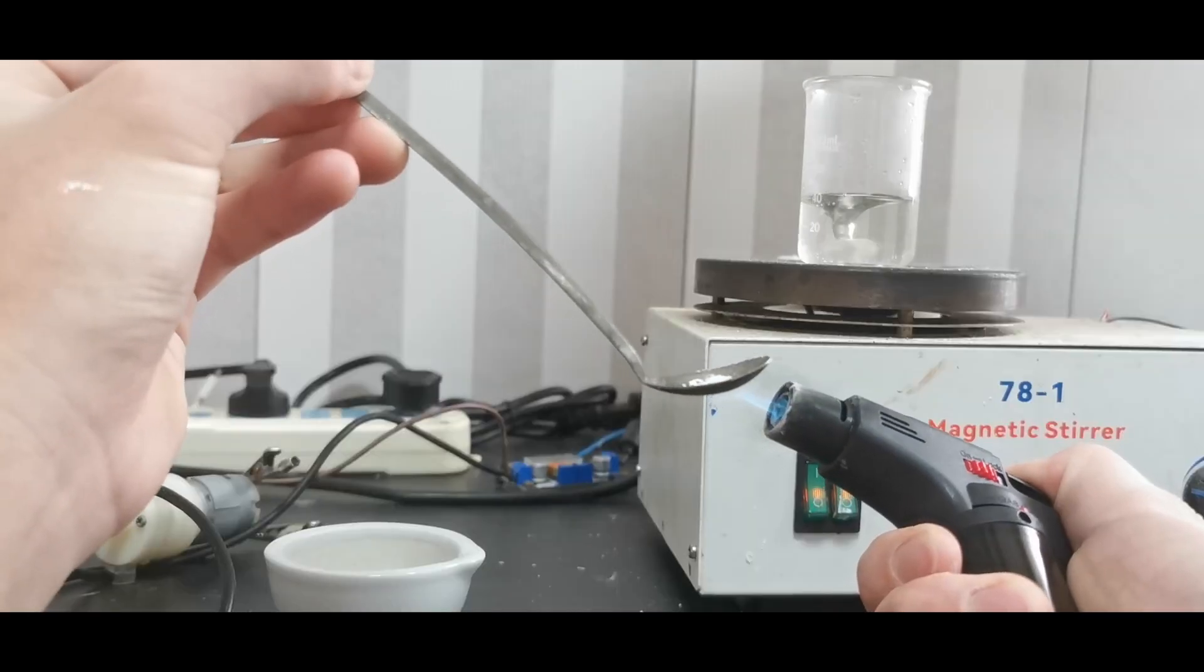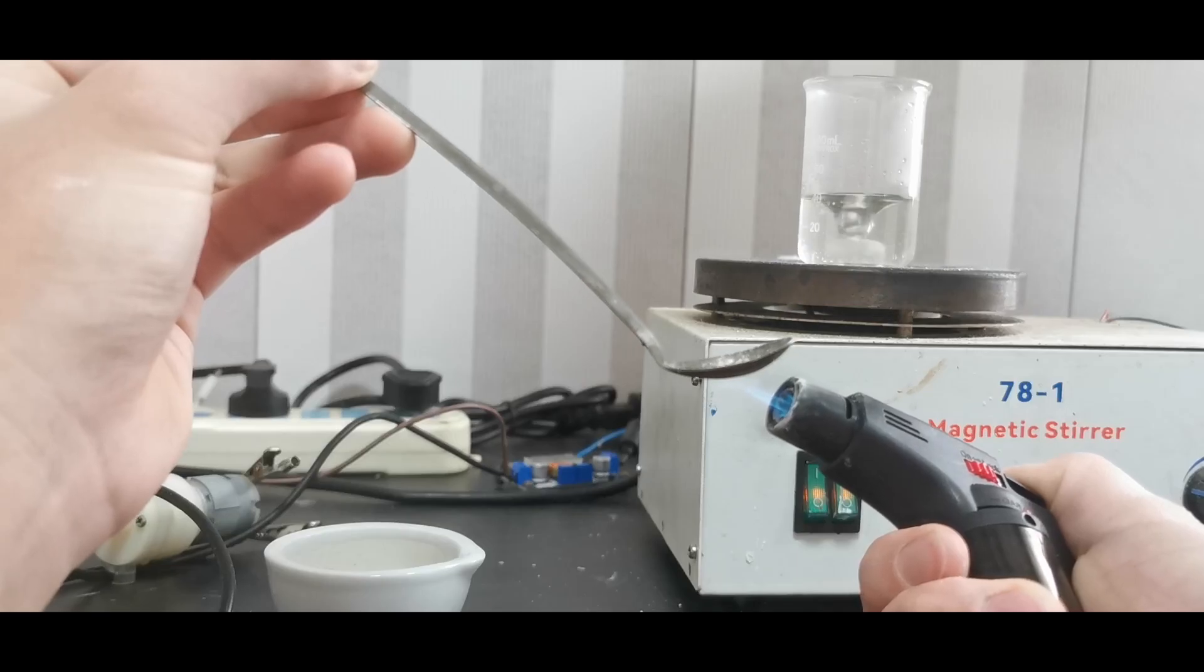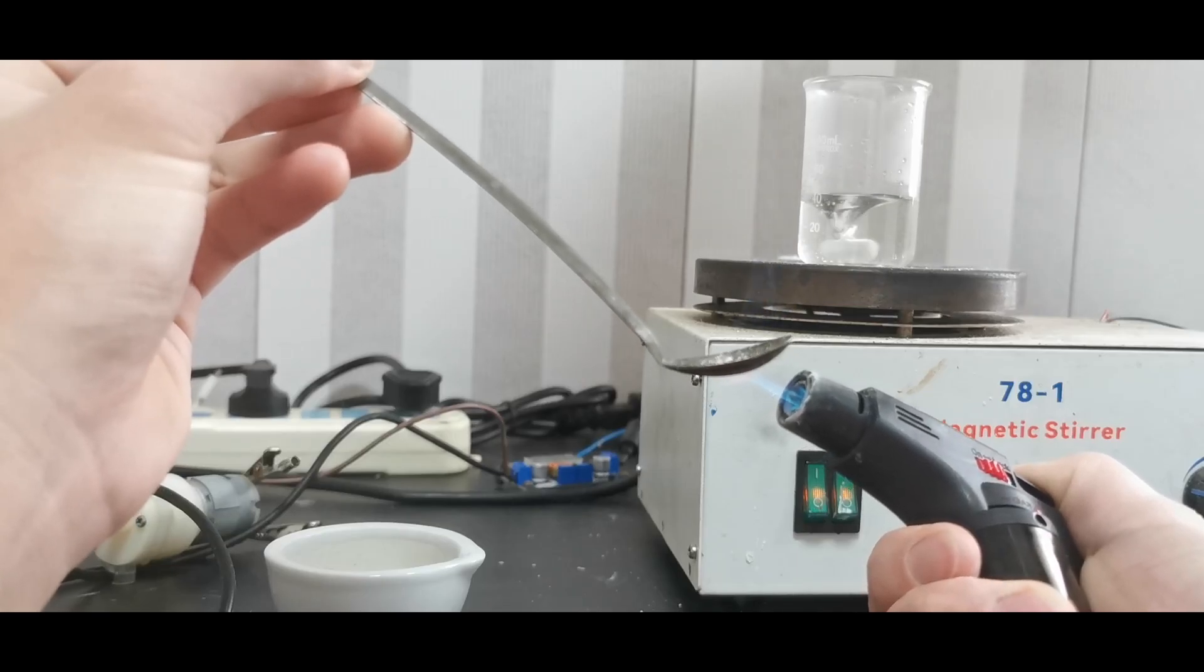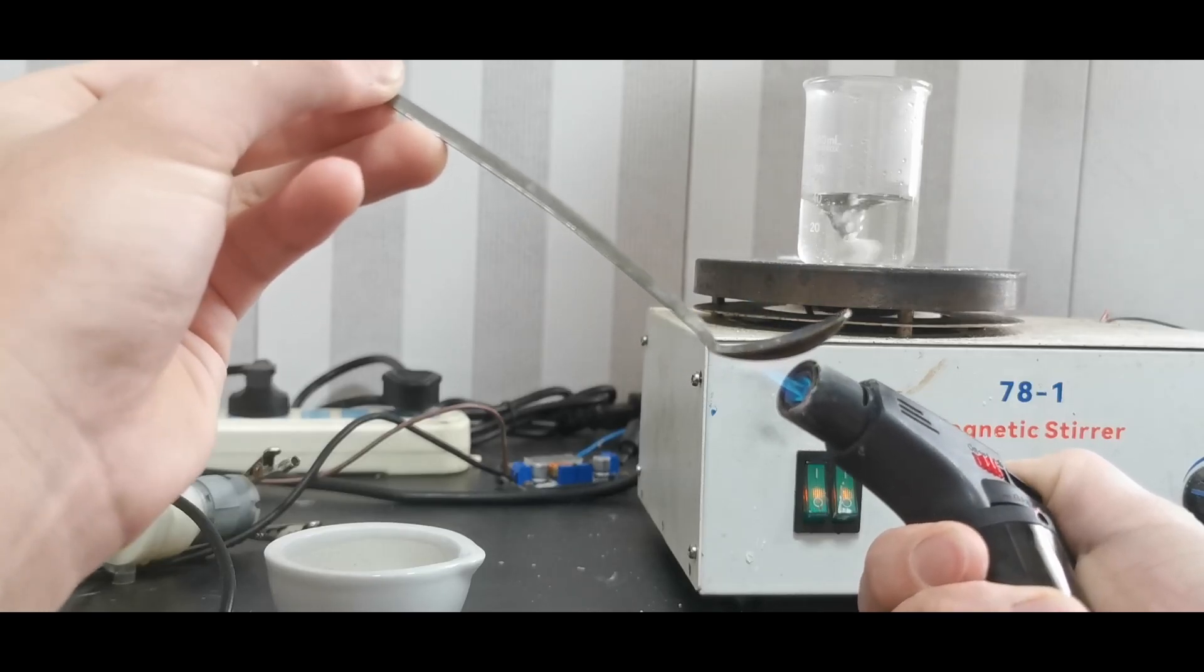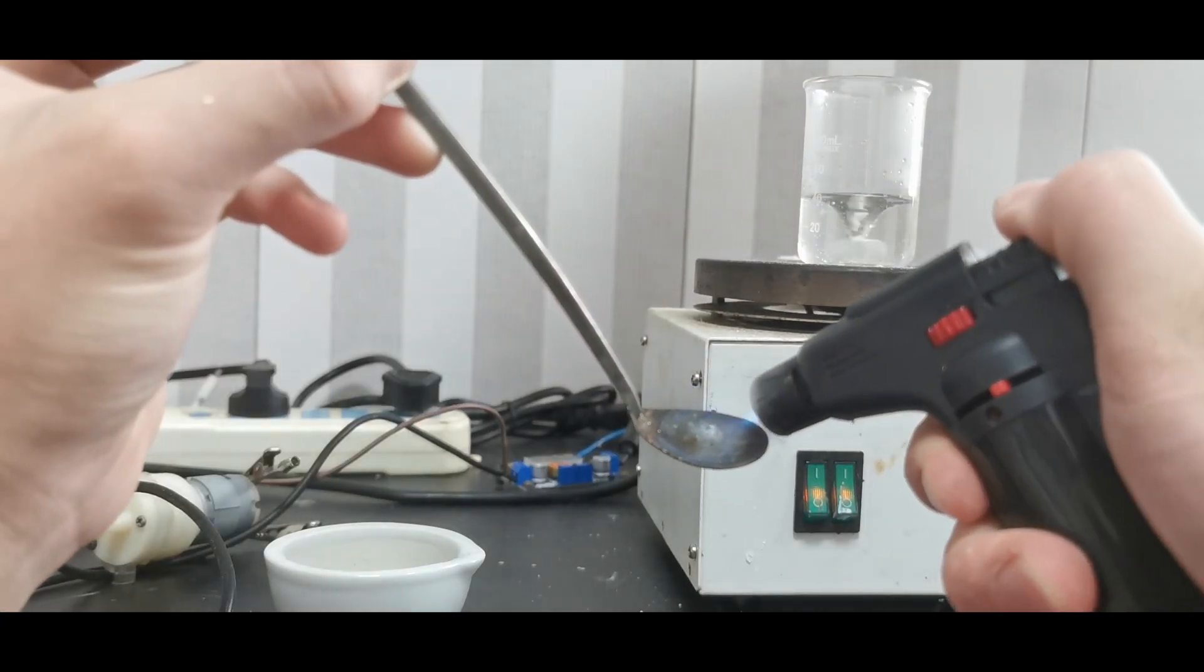I tested the purity of the perchlorate by taking a small amount of crystals and heating it carefully with a blowtorch. Everything evaporated away, and only a tiny amount of white salt remained on the spatula, which tells me that the ammonium perchlorate is at least free from sodium.